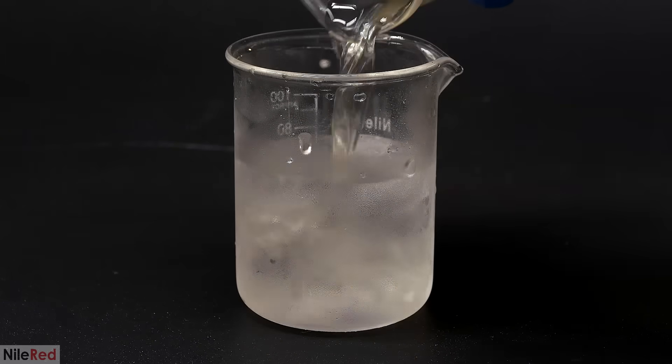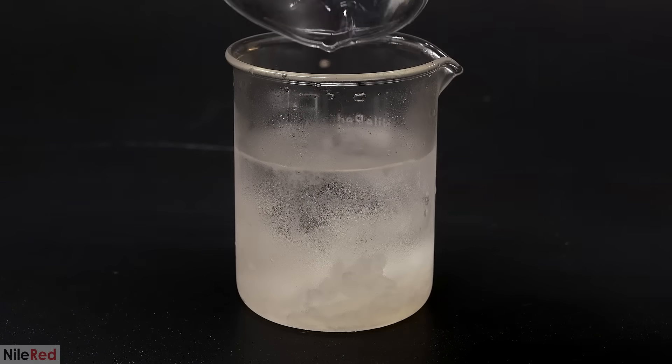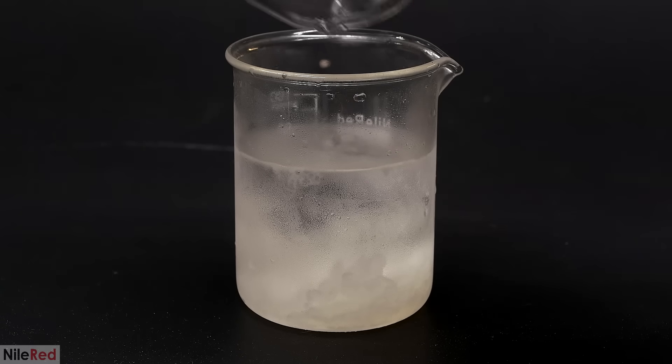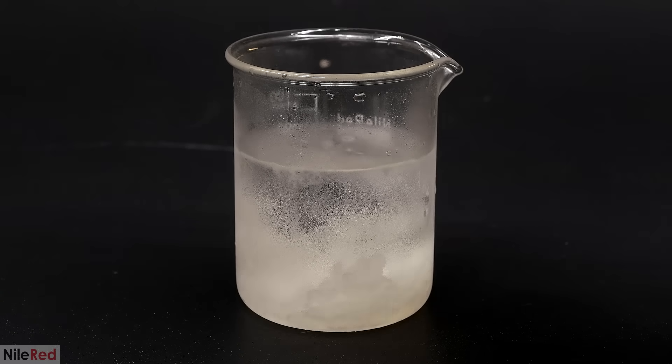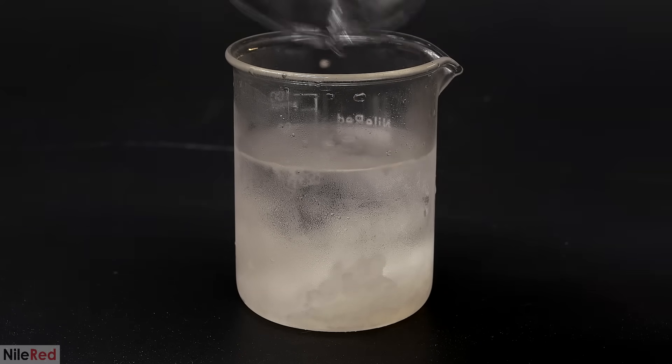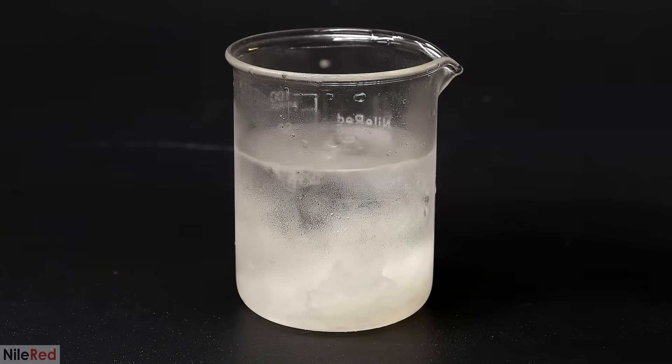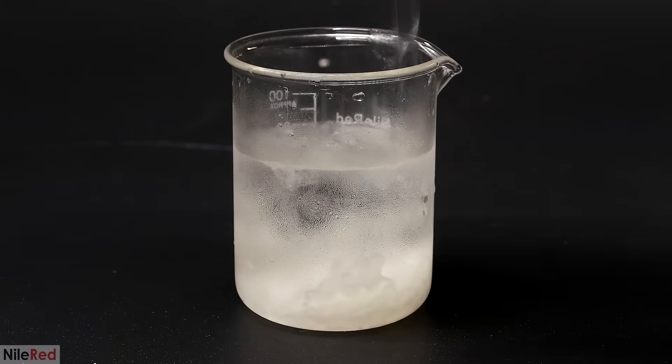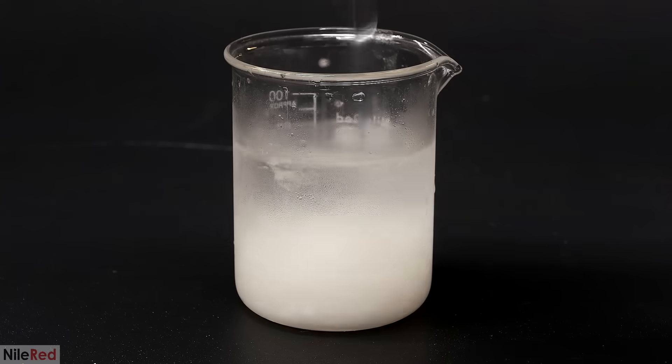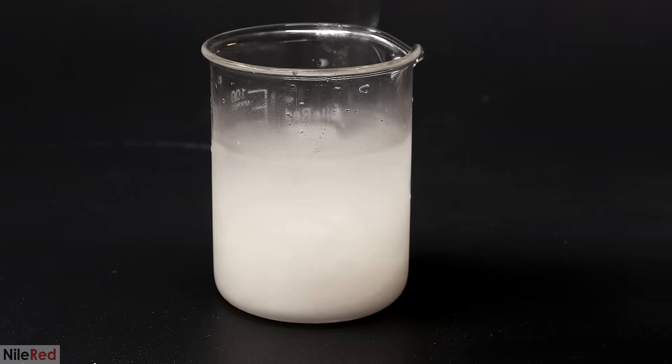While still hot, everything was dumped into 75 milliliters of ice-cold water. Very quickly, we see something crystallize out, and this is the chlorobutanol. I mix things as thoroughly as possible, and you can see that we have quite a bit of white solid now.